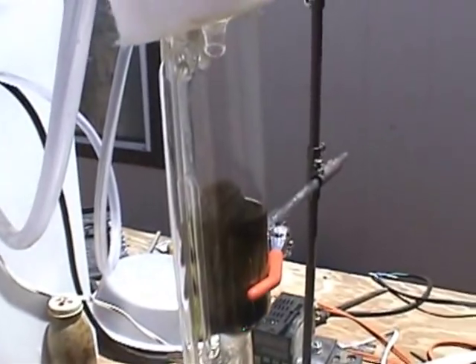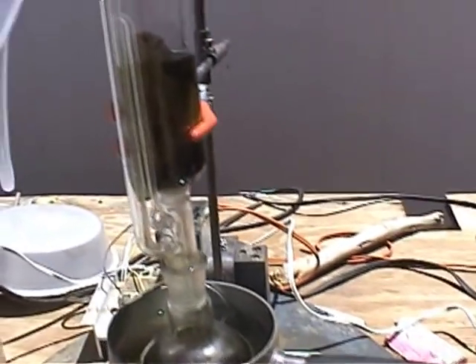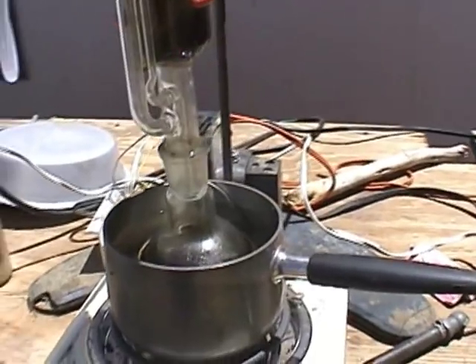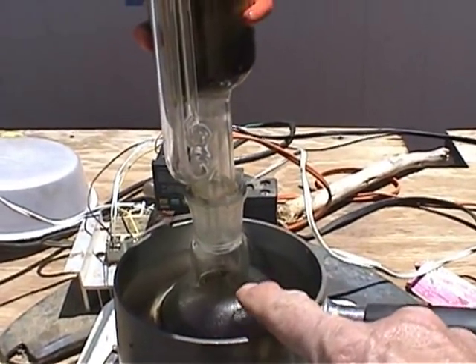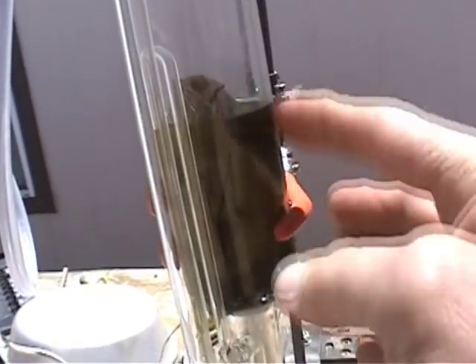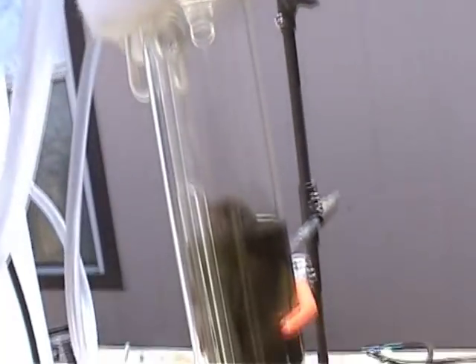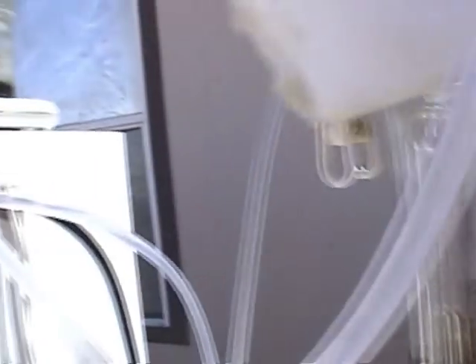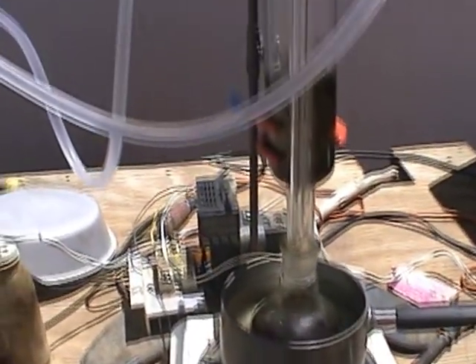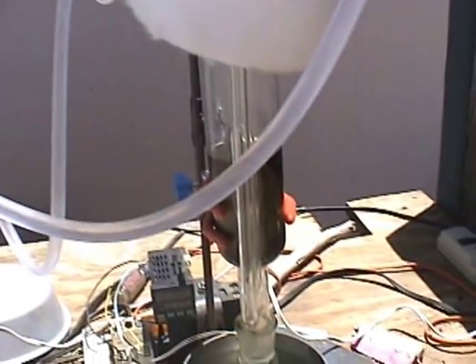I'm sure you saw it dump in my other video. So that completes this video — hopefully it answered any questions. Just to clarify the components from a previous question: this is the boiling flask, this is the Soxhlet extractor vessel — the extraction chamber — and the little gizmo in there is my homemade extraction thimble. I saw I was going to need to buy thimbles at a dollar to five dollars a piece — it's ridiculous. A coffee filter works just as well and gets all the material out. There's the drip — I need to hang it down a little bit, I'll correct that. I'll update you again later on another aspect of my medicine that I make. Thanks for looking.